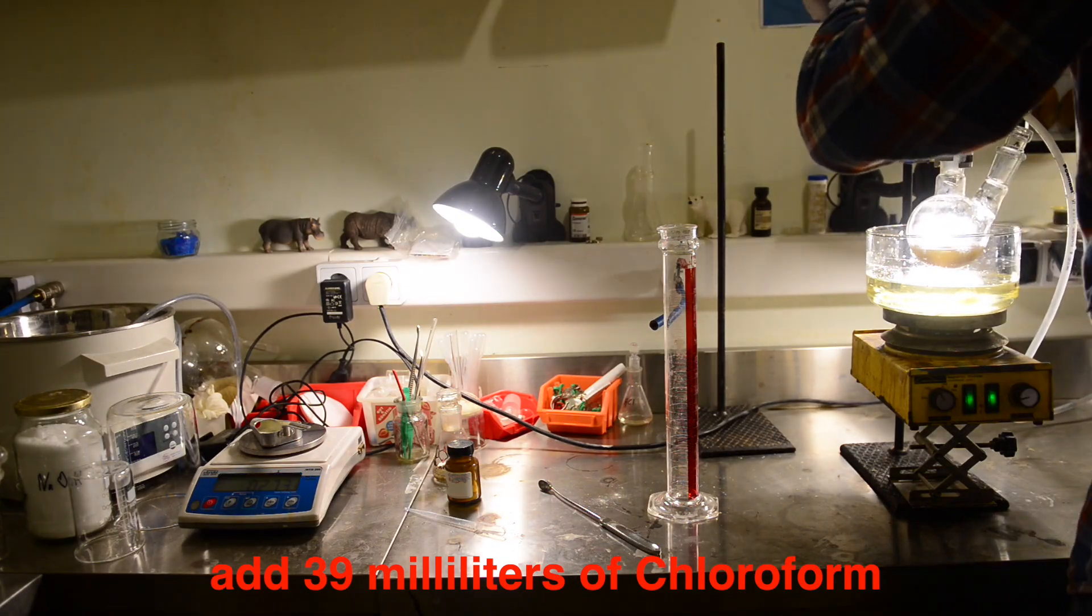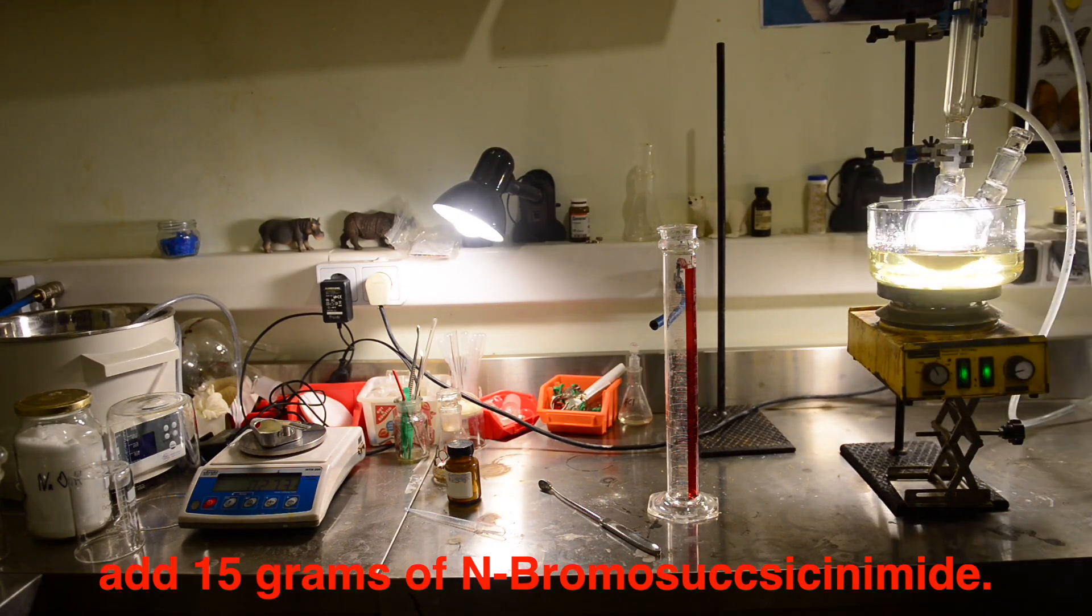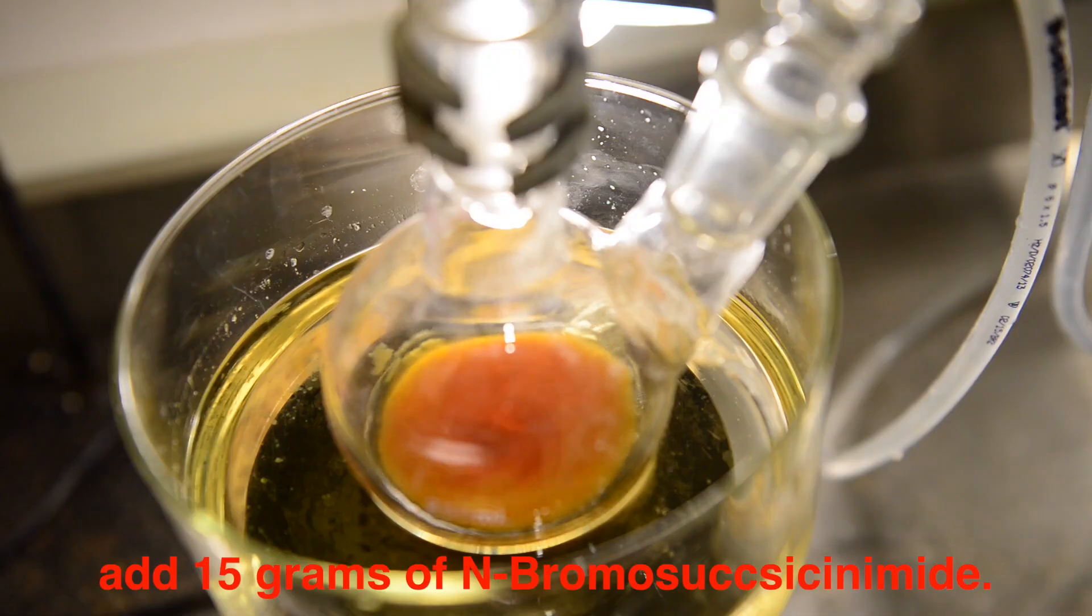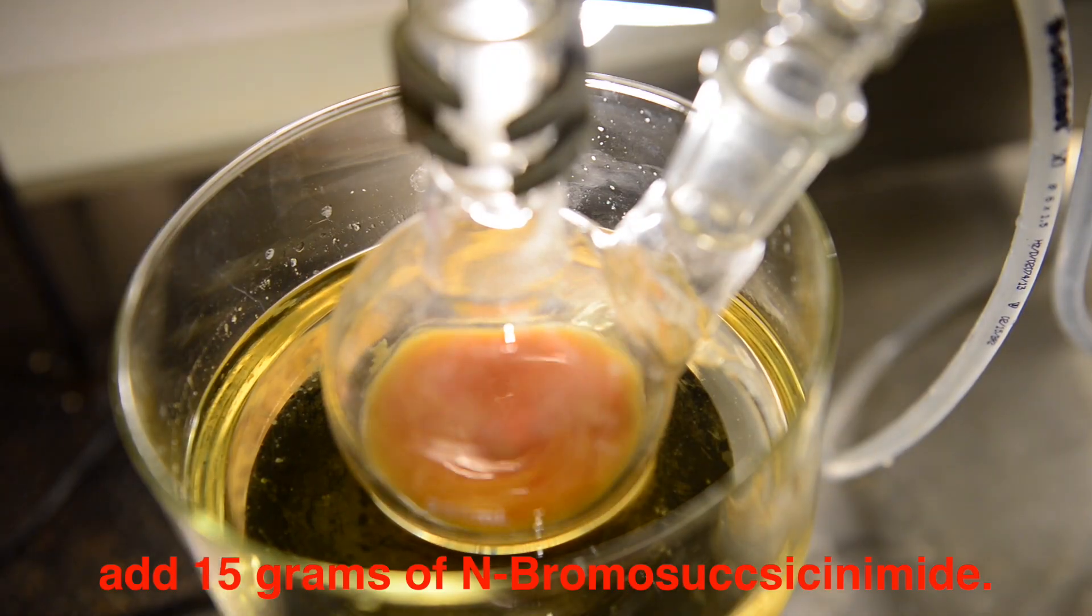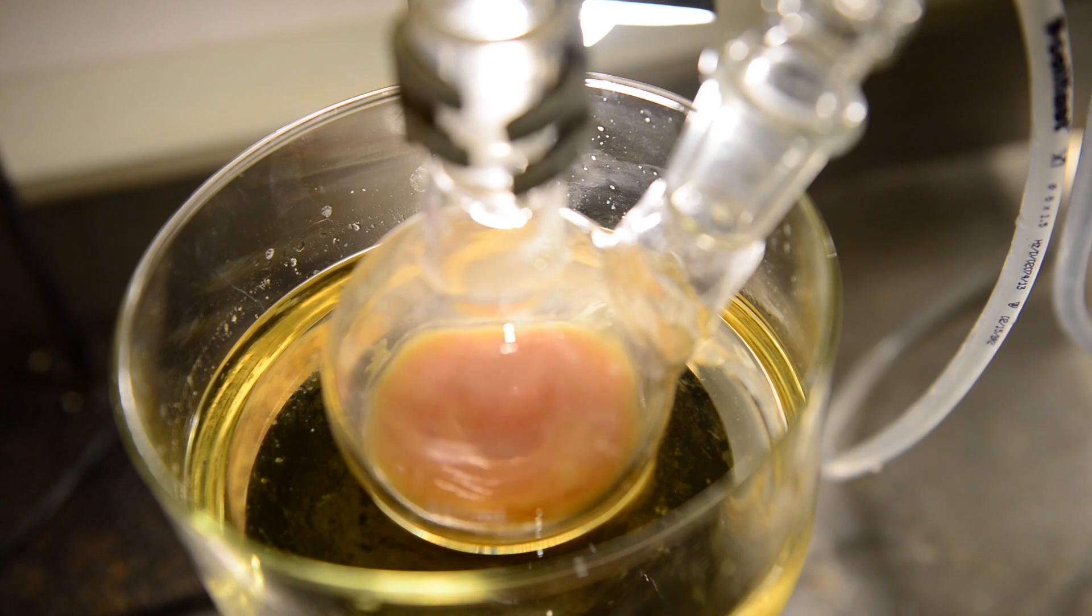We are adding 15 grams of NBS as the last reagent. We are setting the heater to 100 degrees Celsius and start stirring. Reflux must be maintained for 3 hours.